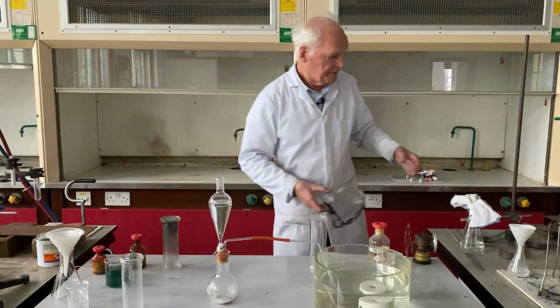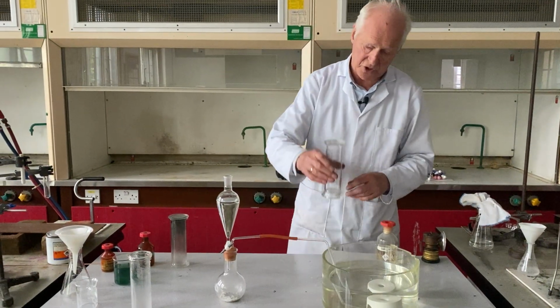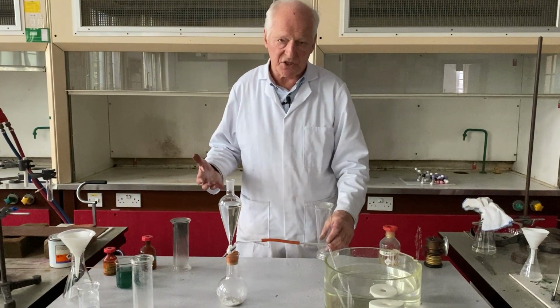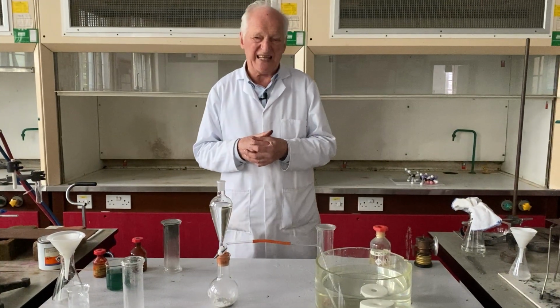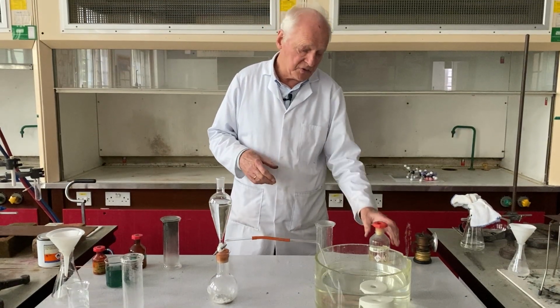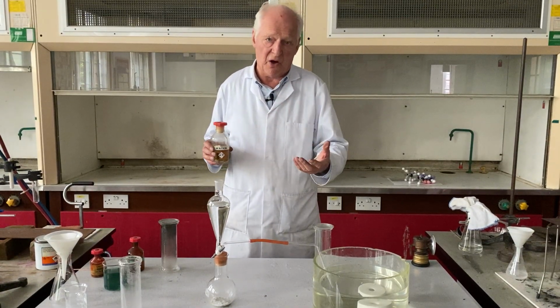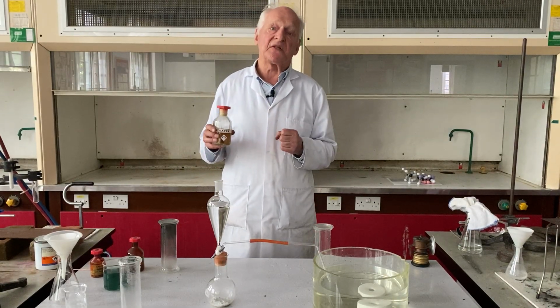Now for the third experiment with our third jar of acetylene here, I wanted to show you its reaction with bromine. Now, bromine is an intensely toxic liquid. In fact, at room temperature and pressure, it's a liquid, but it gives off a gas and it has a dark color, and it is particularly suitable for testing the reactivity of unsaturated compounds because it takes part in what's known as an electrophilic addition, and the bromine is decolorized.